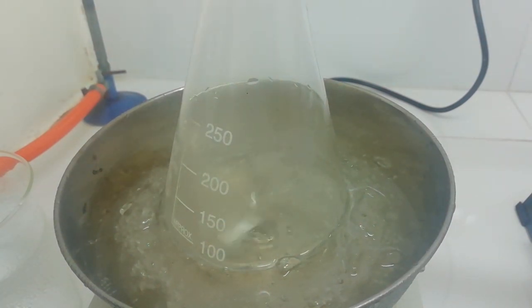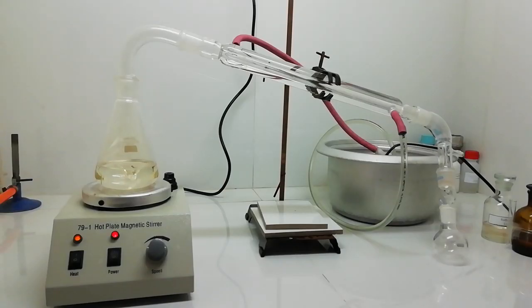Now you can see my distillation setup on the hot plate. You can see our nitration mixture is there. To record this, I removed all the aluminum foils.